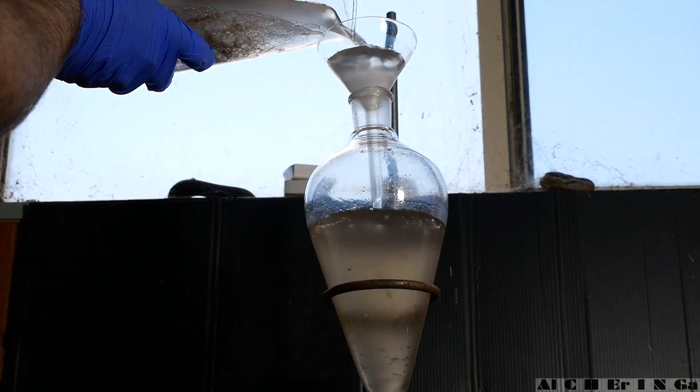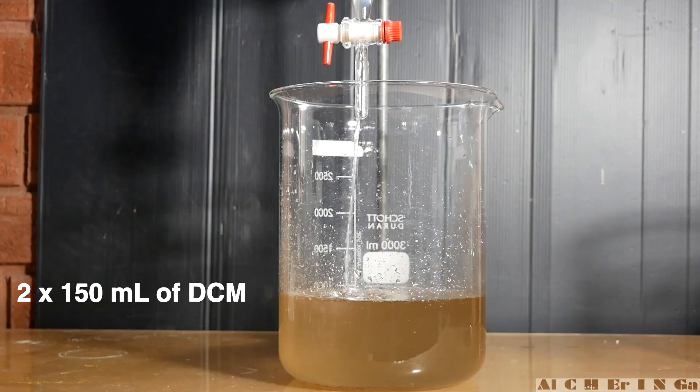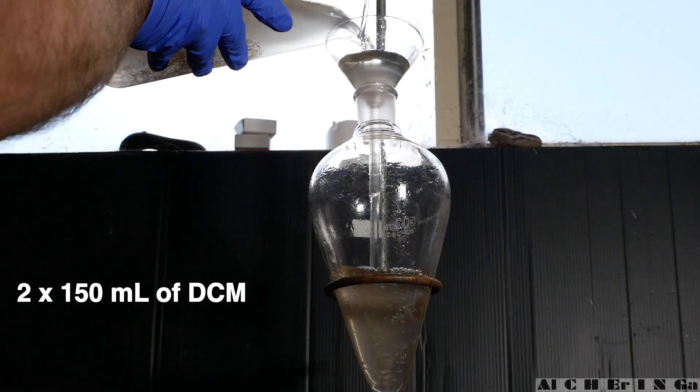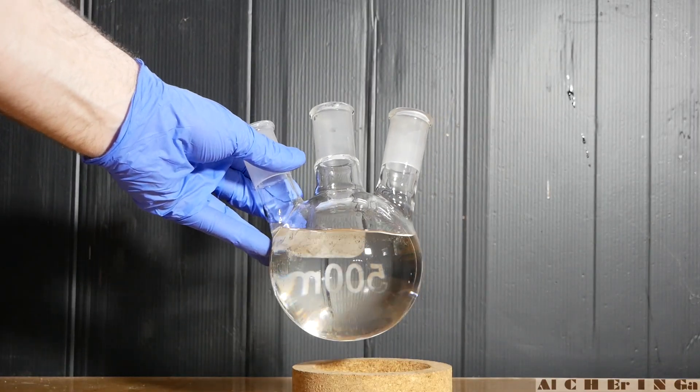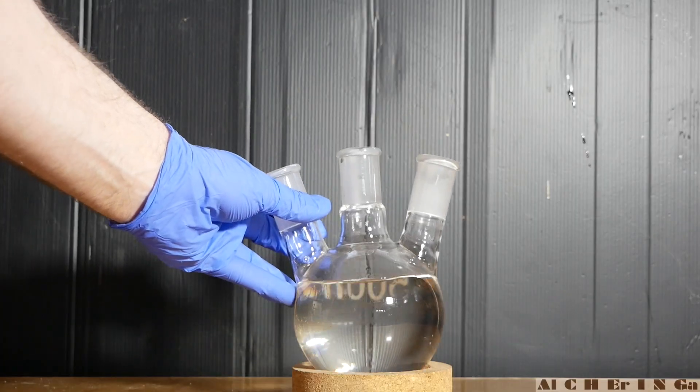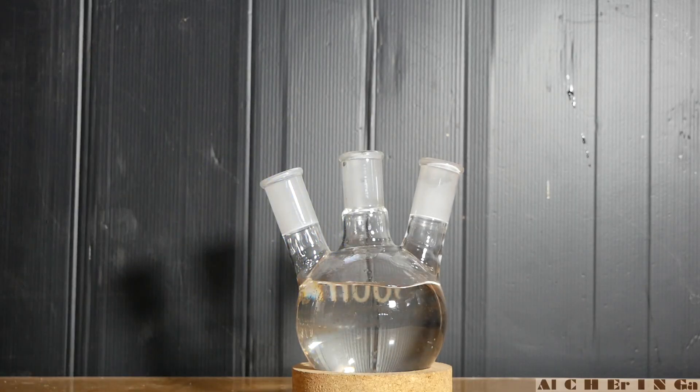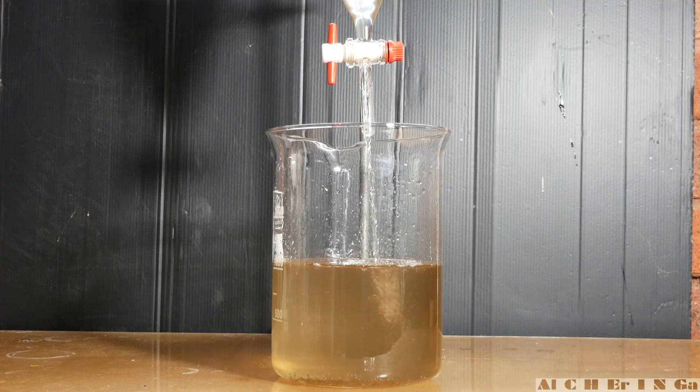Return the aqueous layer back and conduct another two more extractions with 150 milliliters of dichloromethane each. This is the cleaned lower dichloromethane layer that contains our product, 2-amino-1-phenyl-propane in free base form. Decant the remaining upper aqueous layer and discard it.